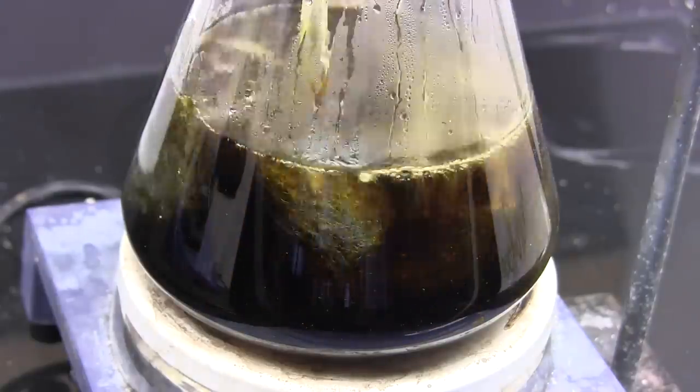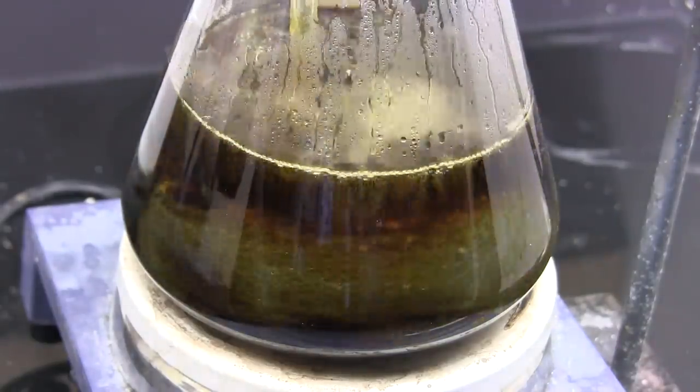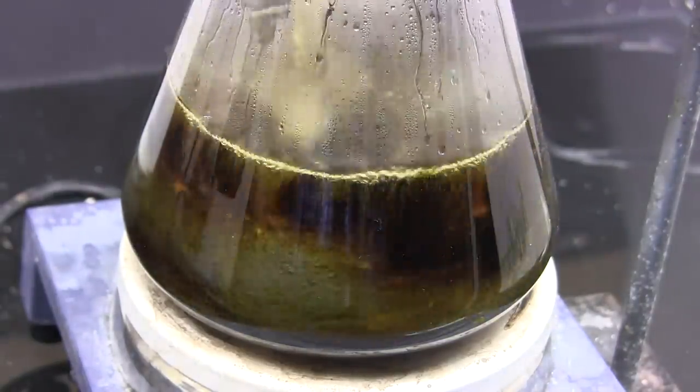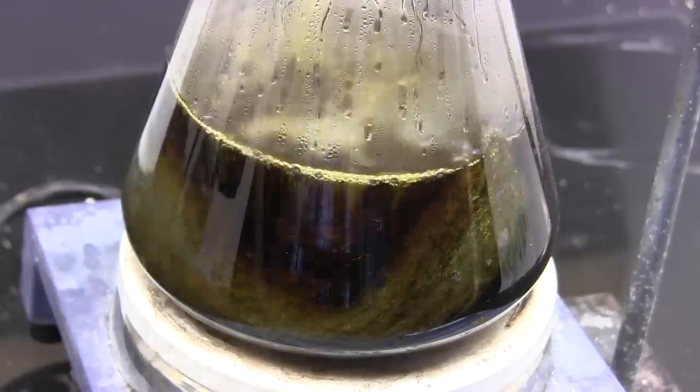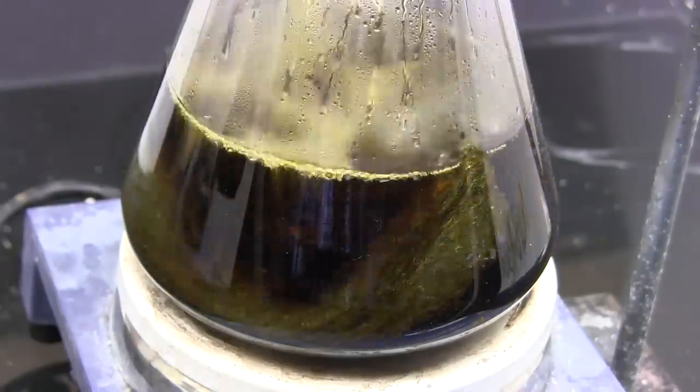Now if you happen to have anhydrous ferric chloride you can add that directly as a catalyst. Using steel wool is a cheaper amateur way of making ferric chloride in situ since we're already injecting chlorine gas.